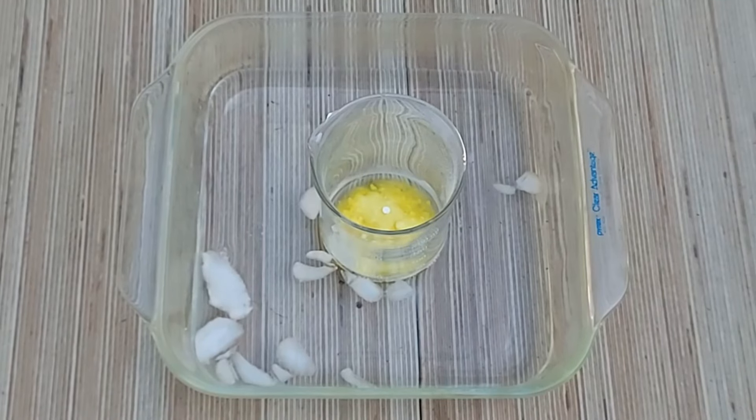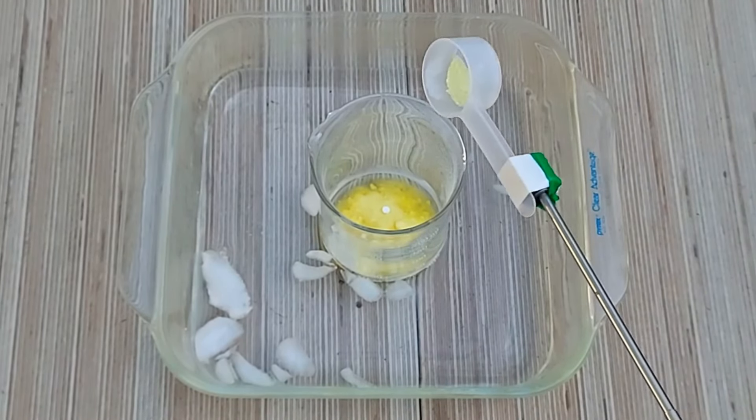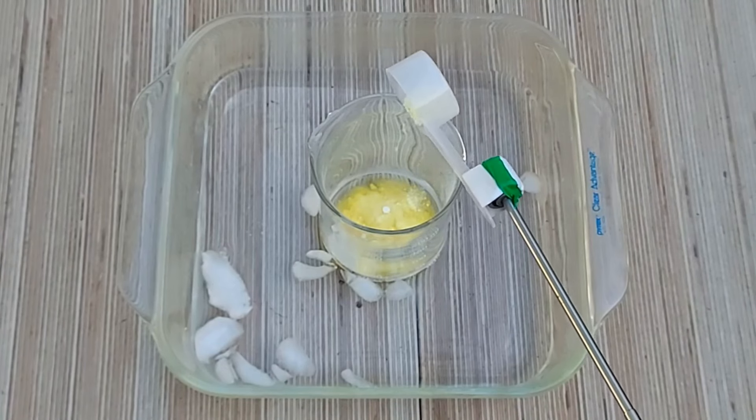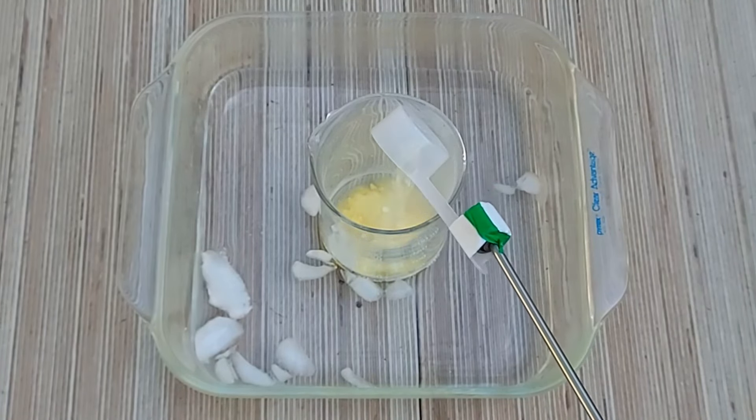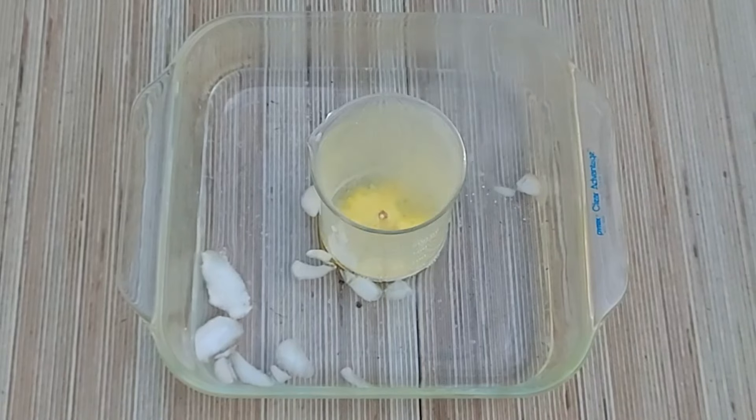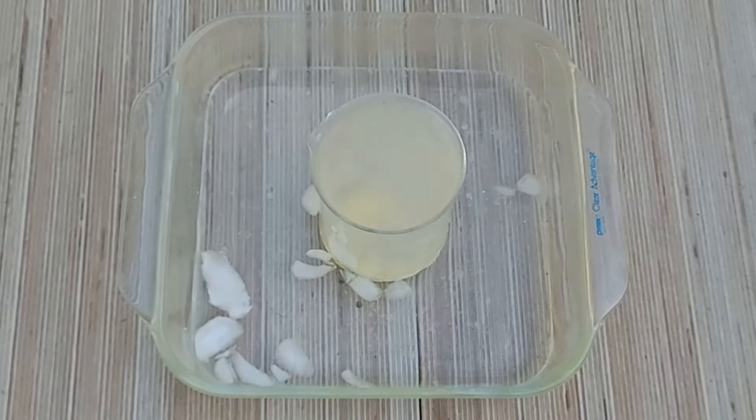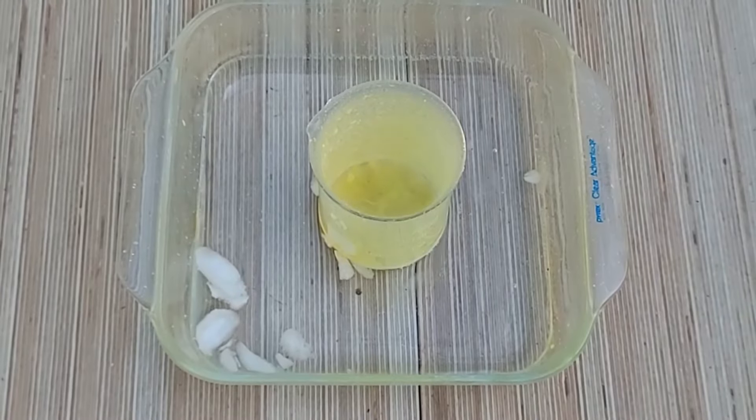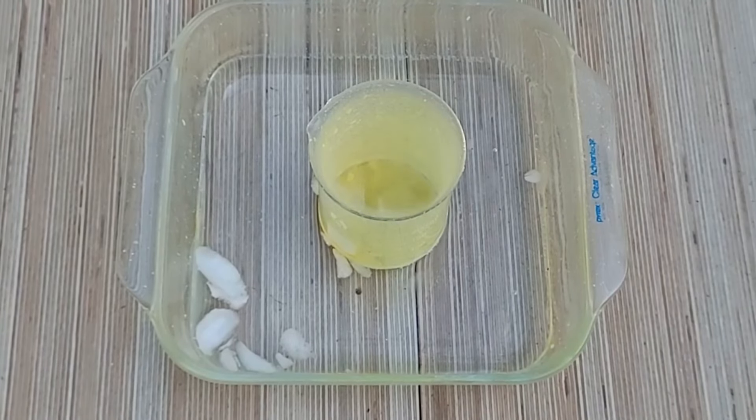As sulfur makes this reaction a bit unstable, let's add a little bit of sulfur. All that smoke made this thing go out of focus. I just wanted to show you the very end of the process here, one of the best reasons you do this outdoors.